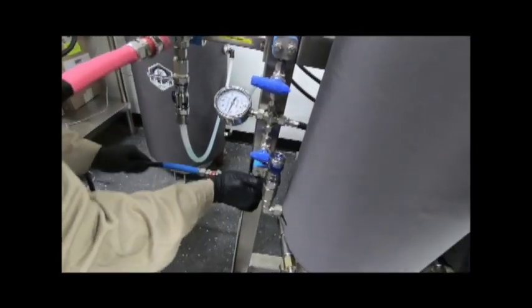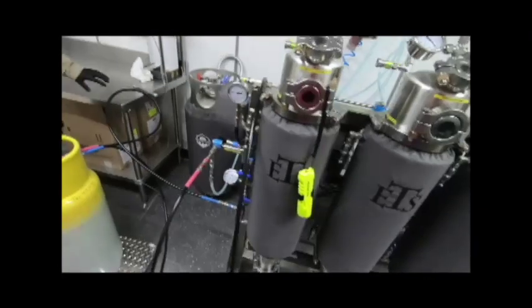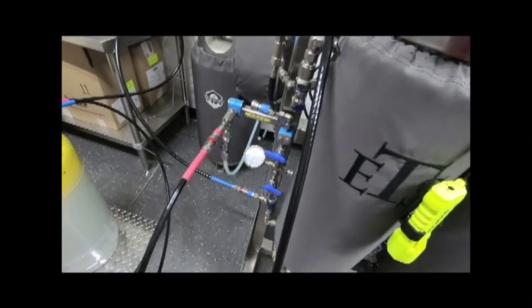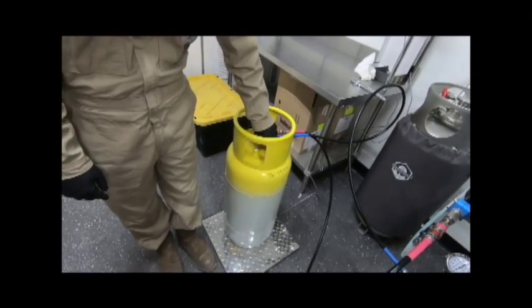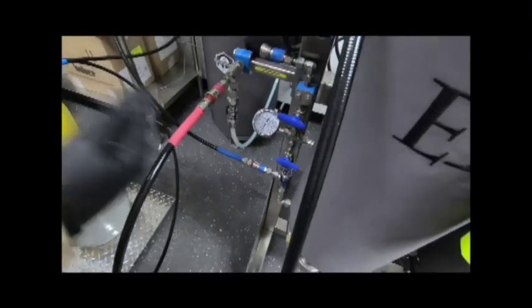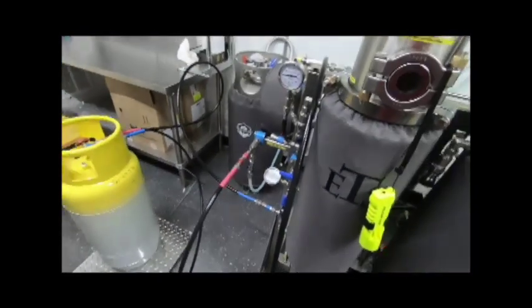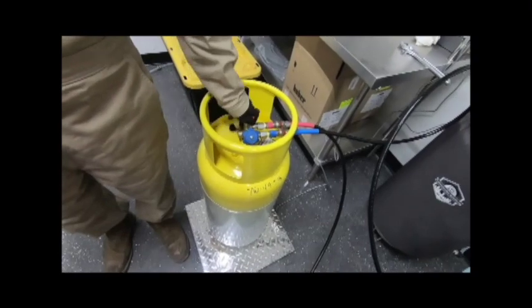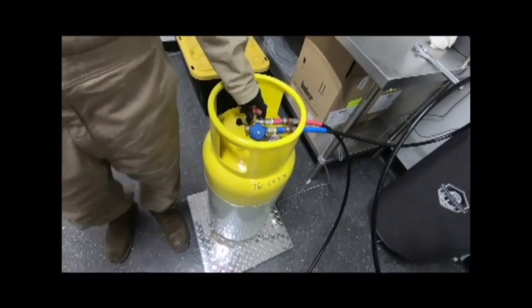Insert other end of blue hose into one of the blue ports located under red port on the discharge rail on the left side of the machine. Open both blue valves on top of operating tank as well as corresponding blue valve on extraction platform linked by hose. Open red valve on top of operating tank. Open red inlet valves on top of extraction vessel one.